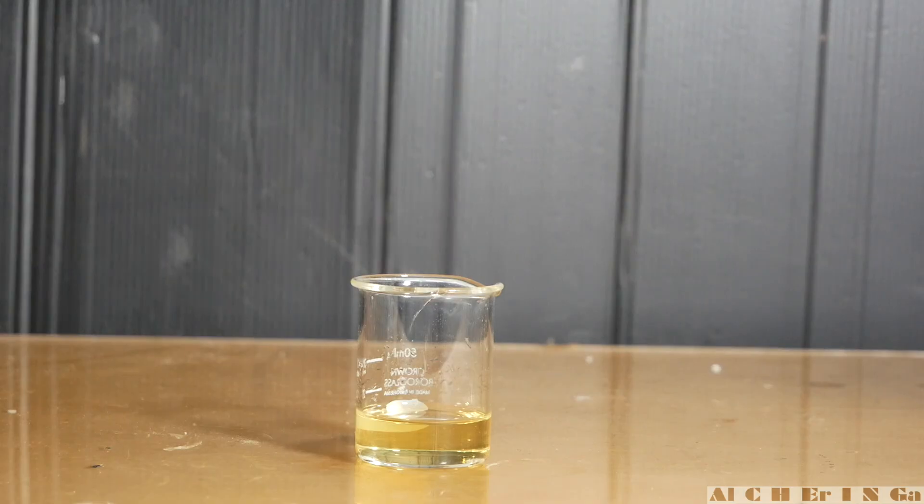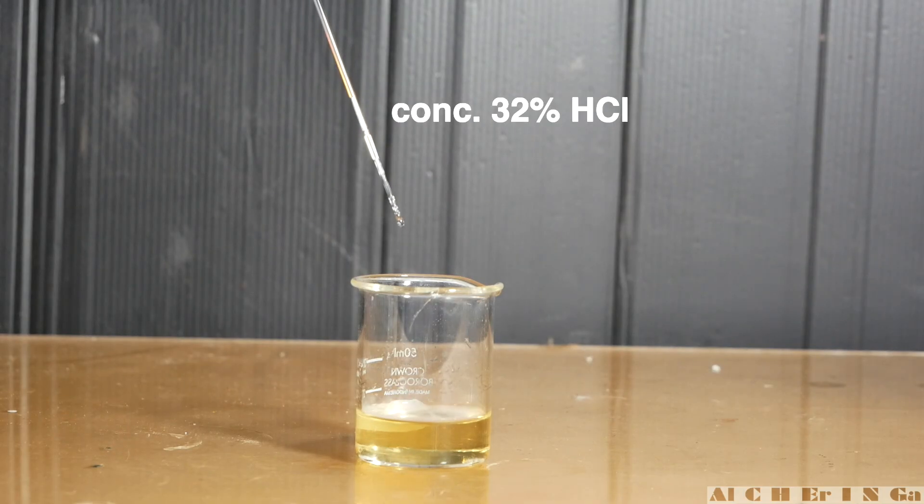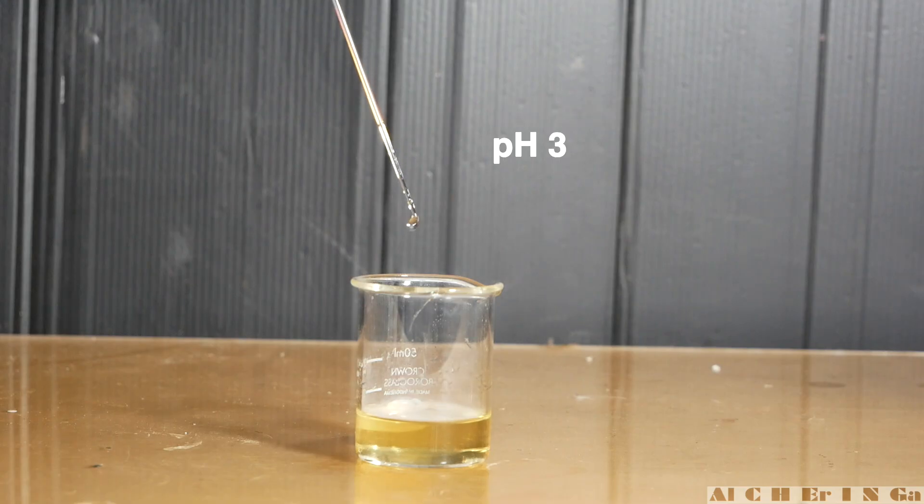Now, transfer the mixture into a suitable container and start adding concentrated 32% hydrochloric acid slowly to pH 3. As we can see, a white mist is given off.